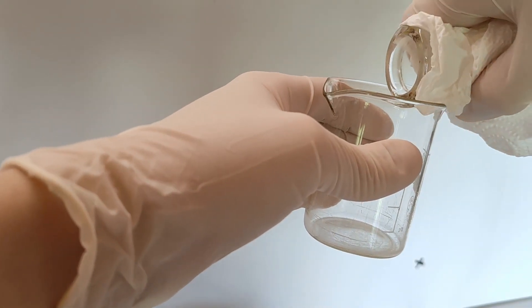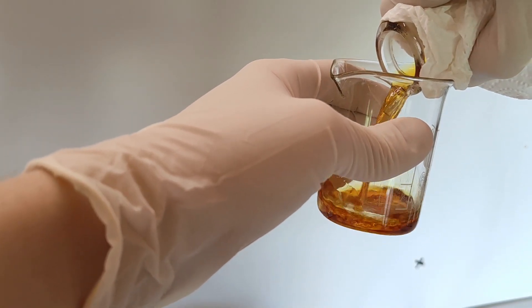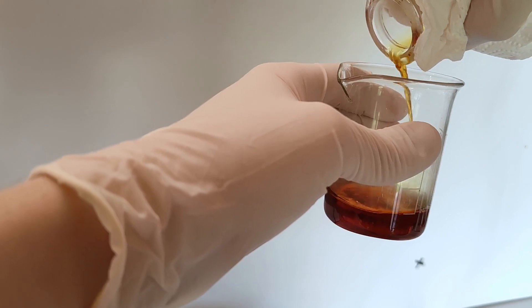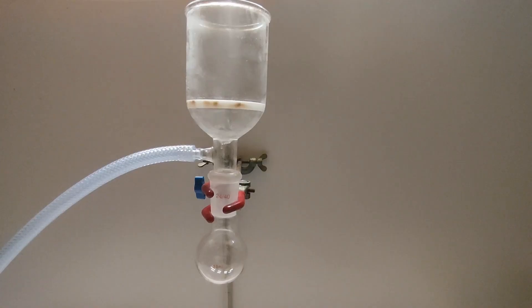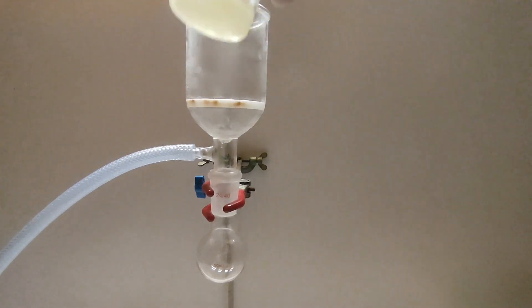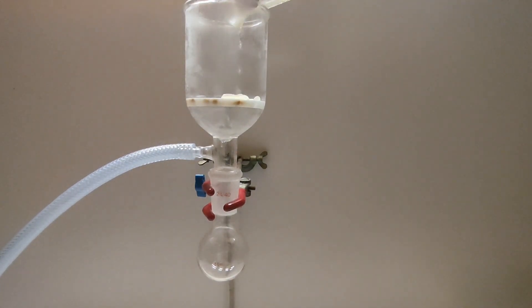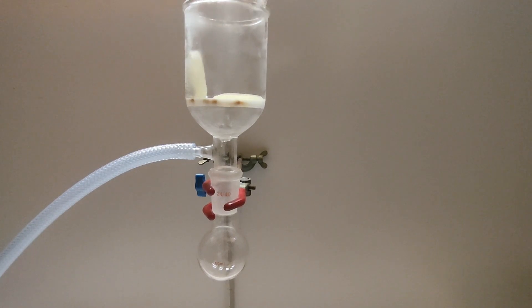The distillate is put into a small beaker and then frozen in the freezer at minus 20 degrees Celsius. The frozen cake is then placed into a vacuum filter and filtered.